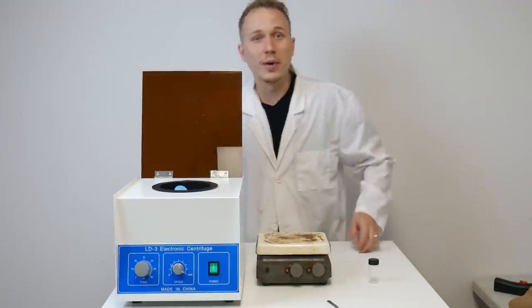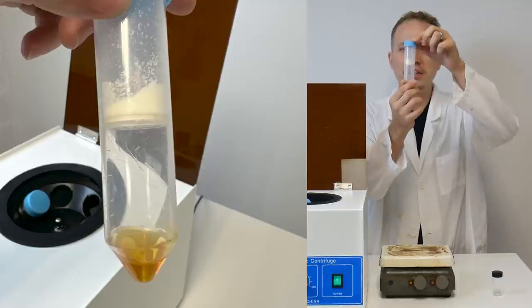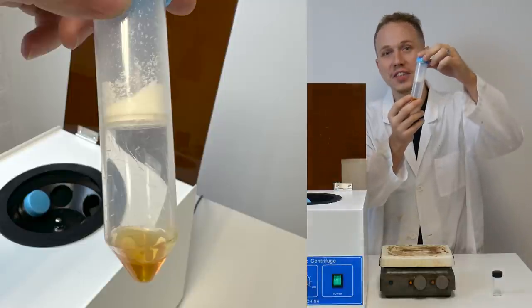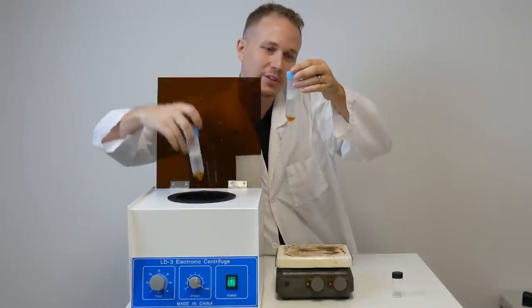Once the machine's wound down and finished, you can go ahead and take out your samples. And as you see here, I have a pure white THCA on top and some beautiful terps on the bottom. And I have two samples of these.